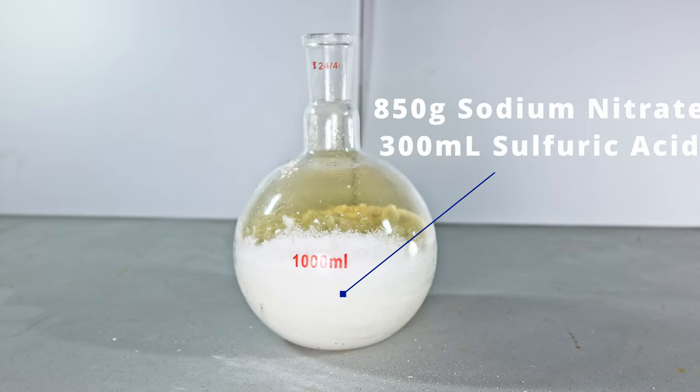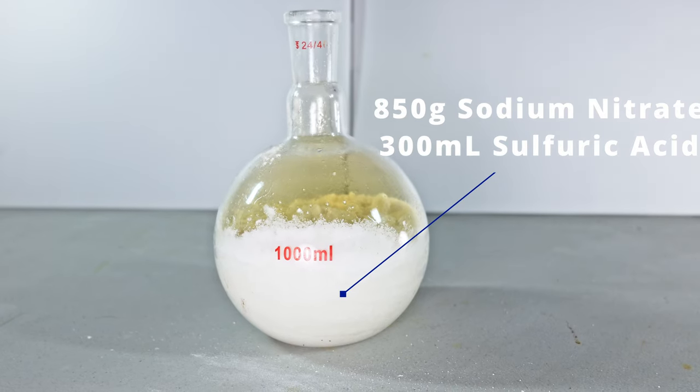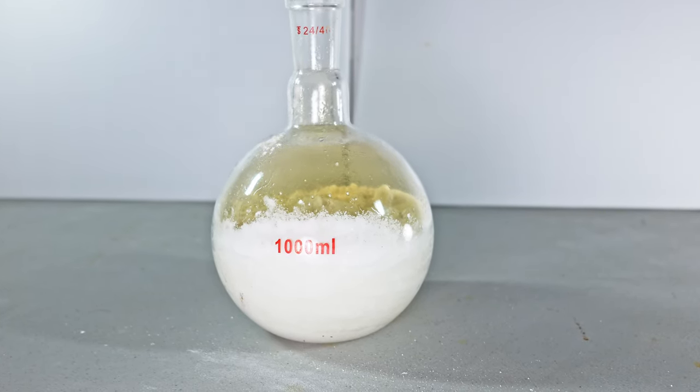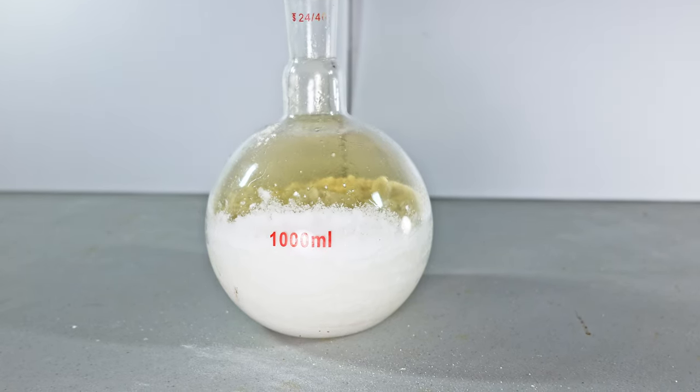After you've added your sodium nitrate and your sulfuric acid, you're going to notice this little yellow brown haze over there. That's actually some of the nitrogen dioxide being released because this reaction is already going. Now we just have to heat it up to get our nitric acid.